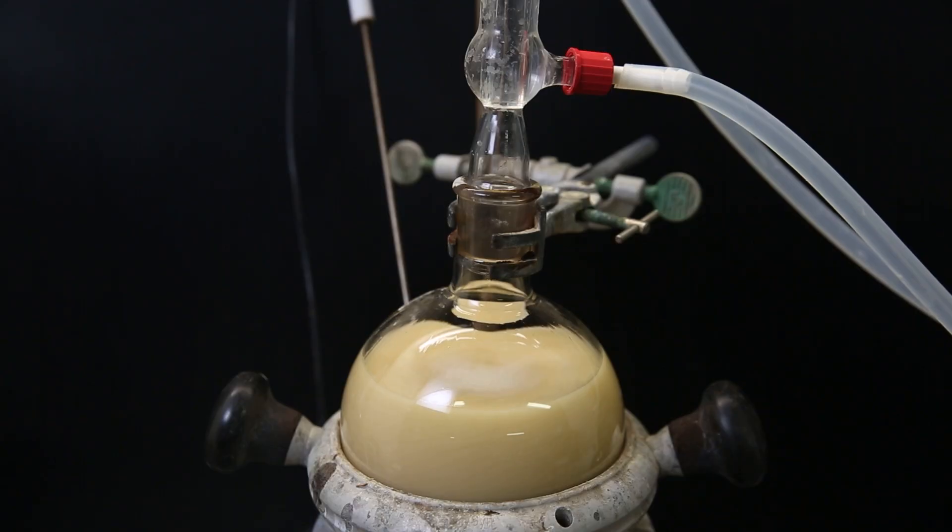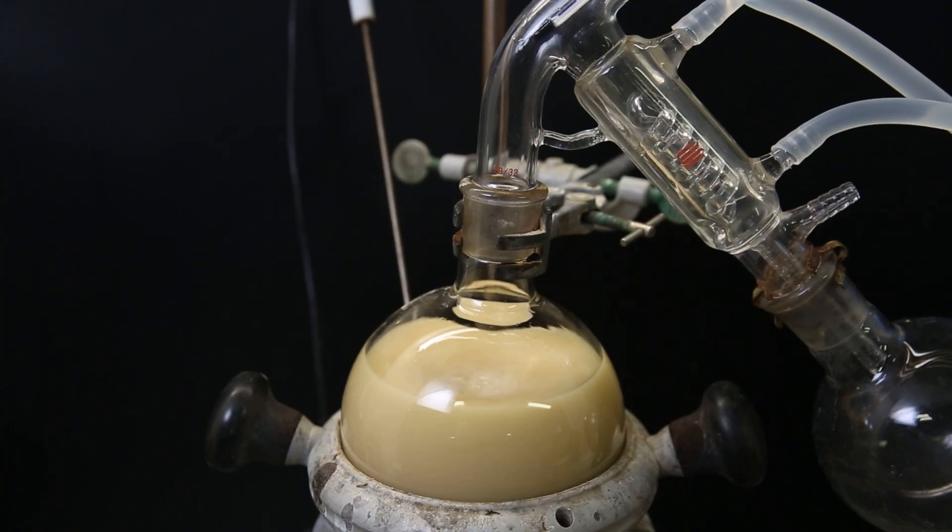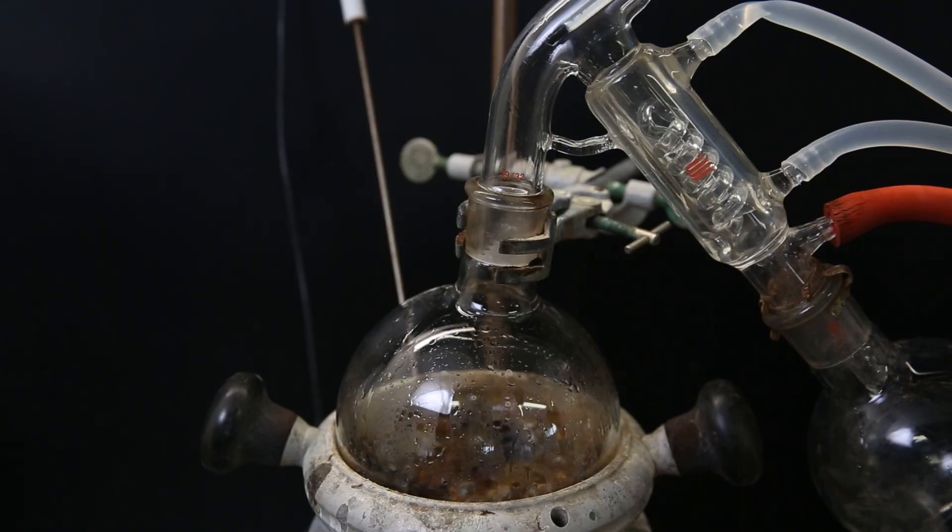When I return the next day, the mixture has turned more yellow, and the reaction should be finished. So like earlier, I swap the condenser for a short-path distillation apparatus, and I distill off all the solvent, and the last bits I pull out on a strong vacuum.